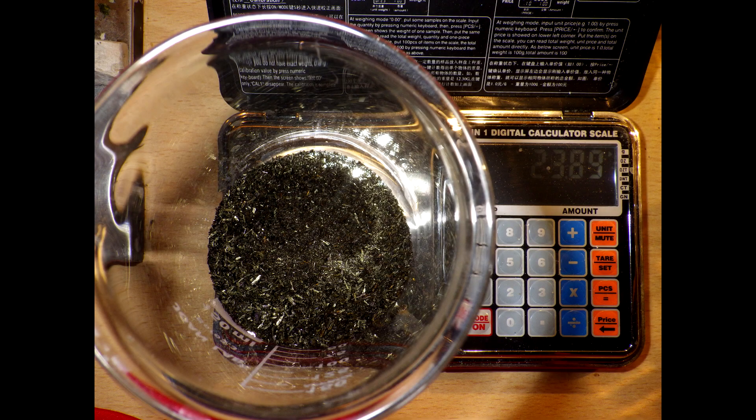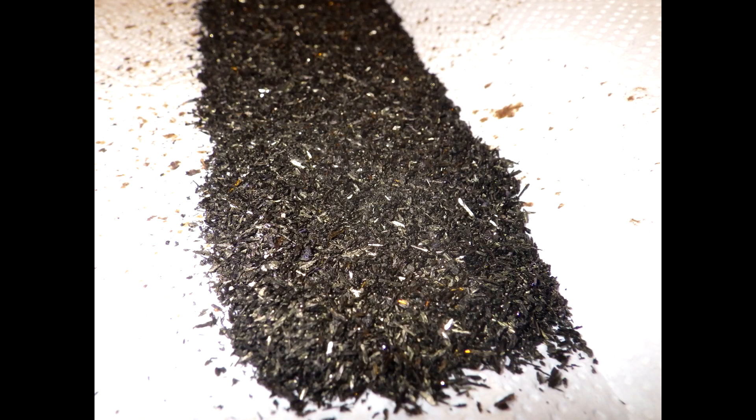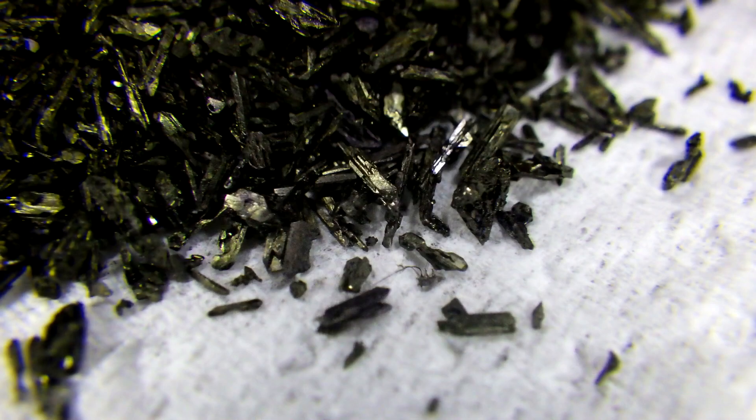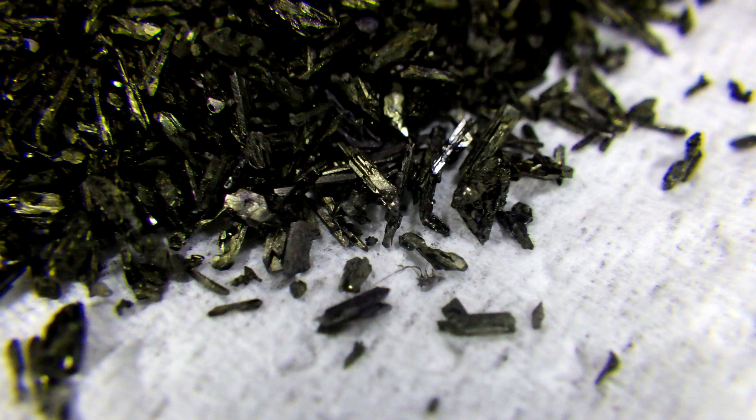When dry, I have almost 24 grams of dark crystals with a golden sheen. This is a 92% yield. Quite nice, isn't it? Almost unbelievable.